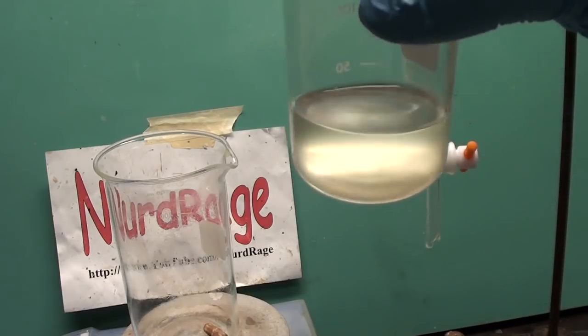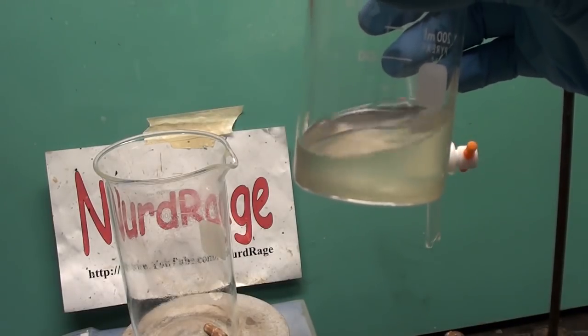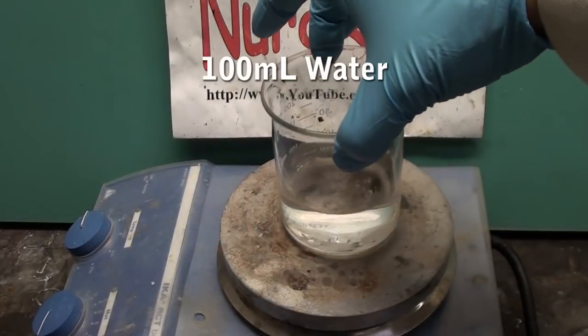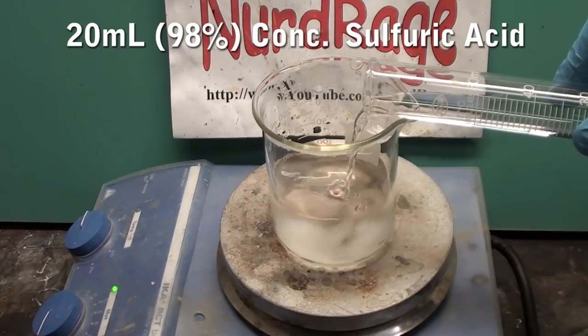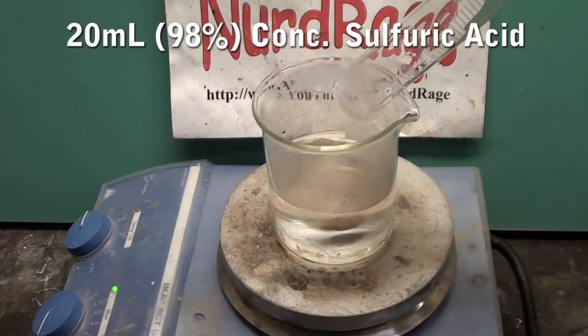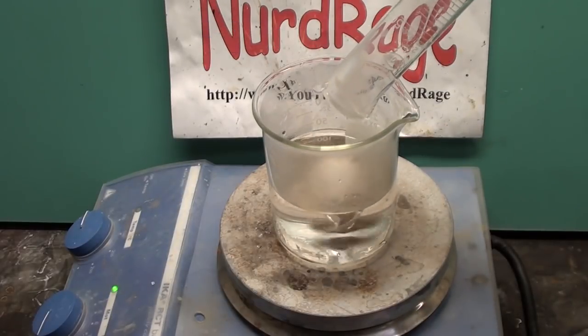Okay here's the ketazine. Now we convert to hydrazine sulfate. First start with 100mL of water and a stir bar. Then with stirring add in 20mL of concentrated 98% sulfuric acid. The solution will heat up a lot.